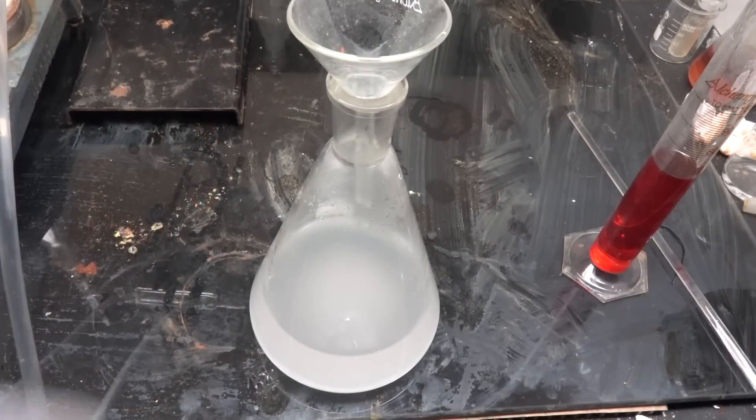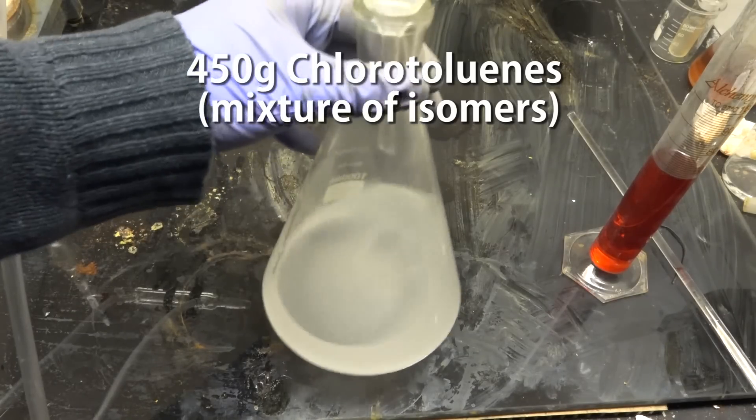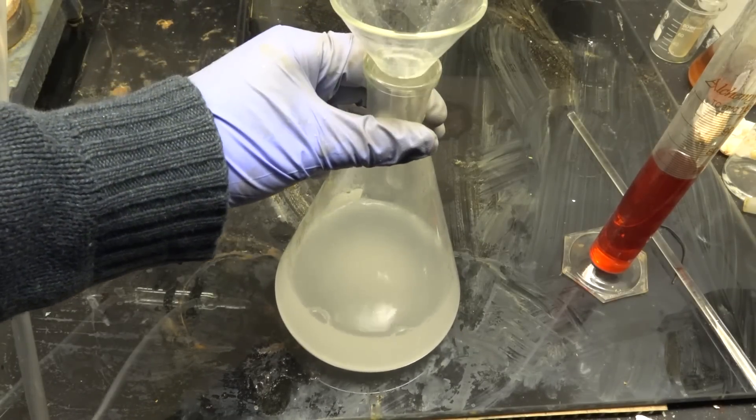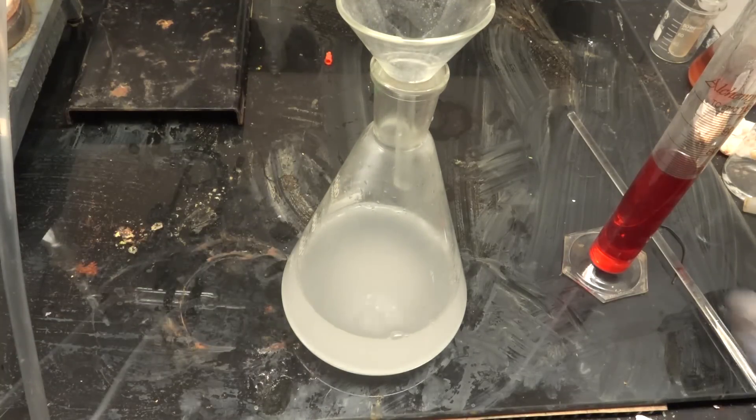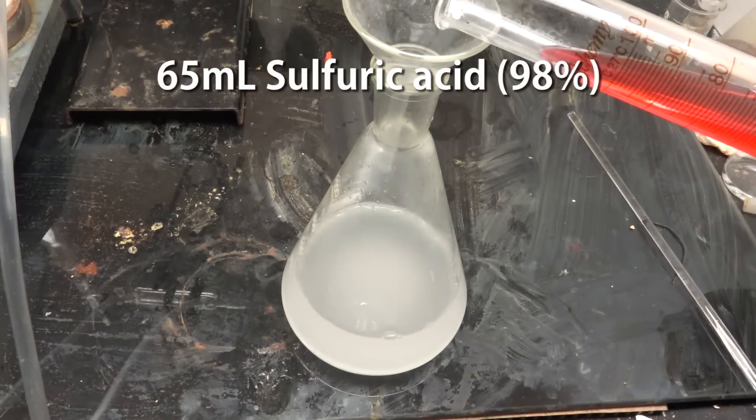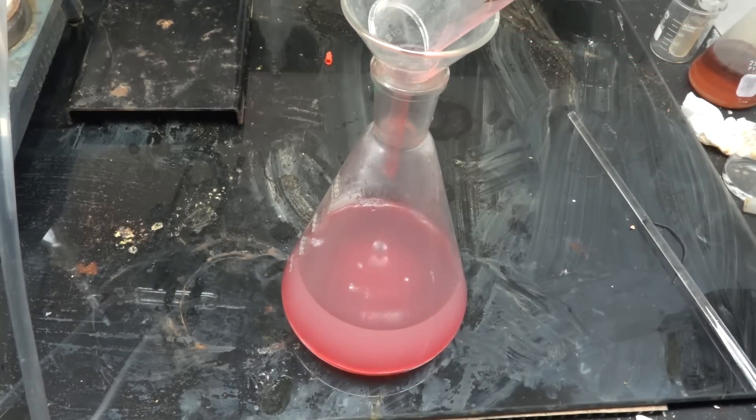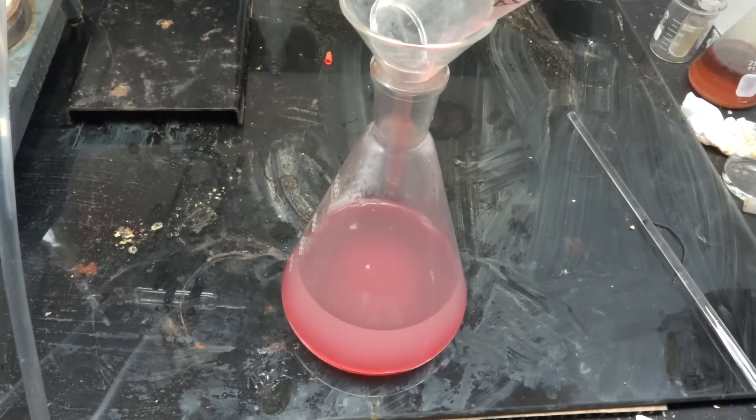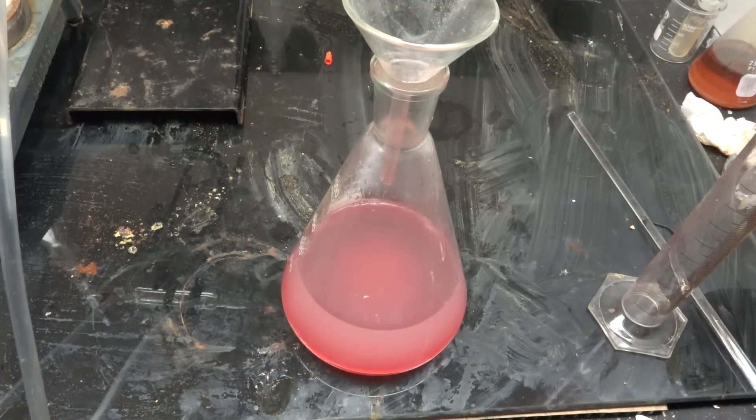So here is our mixture of chlorotoluene isomers, about 450g worth. Now chlorotoluene is clear but my sample is cloudy due to tiny amounts of water. This is not a problem though. Now add about 65mL of concentrated sulfuric acid. This corresponds to a one-third molar equivalent. My acid is red because it's a low grade drain cleaner acid. High quality acid will work better but isn't strictly necessary.